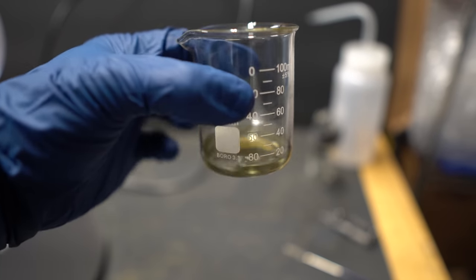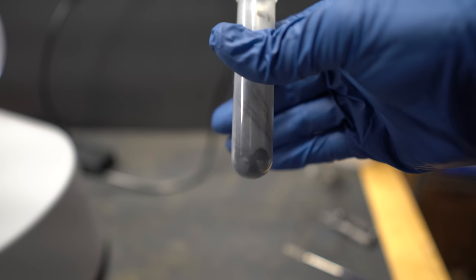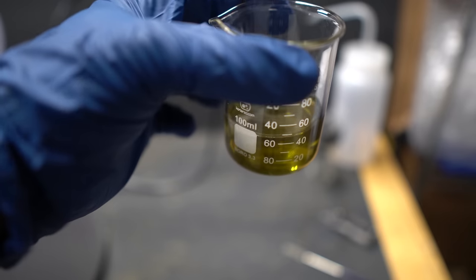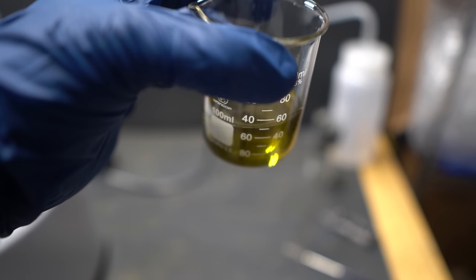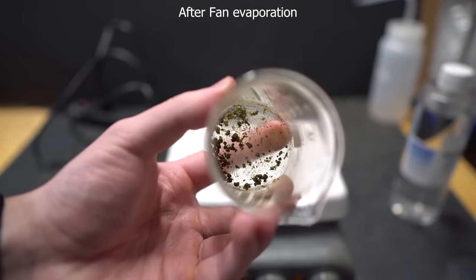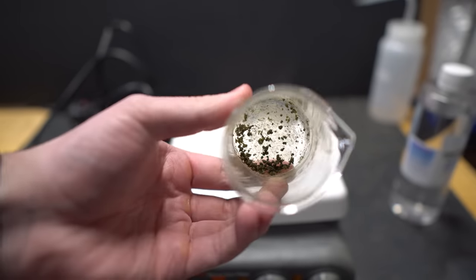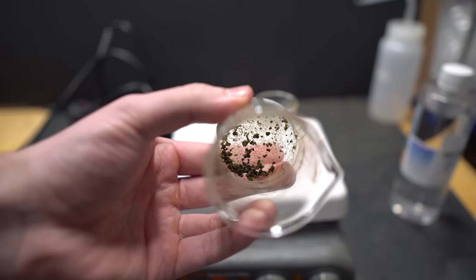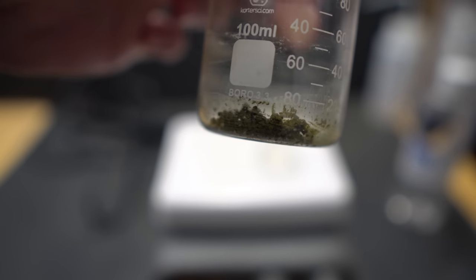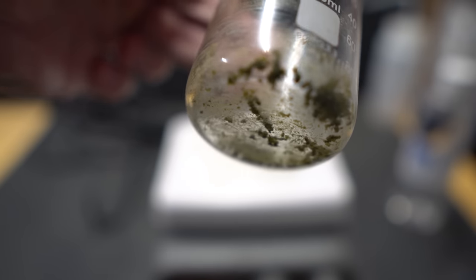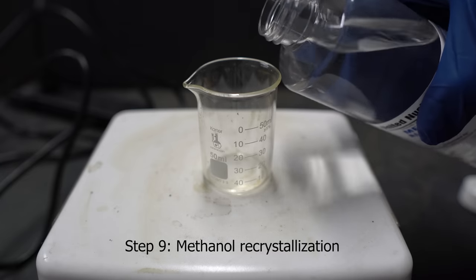When I poured out the acetone, luckily none of the charcoal decided to get up and stir around. You can see that our solution is a lot more clear now. It's important to let it run as long as possible as the solution does look clear right here, but there's actually a tiny amount of charcoal still in the solution. I then decided to do a fan evaporation so we can get our crude product and then perform a recrystallization.